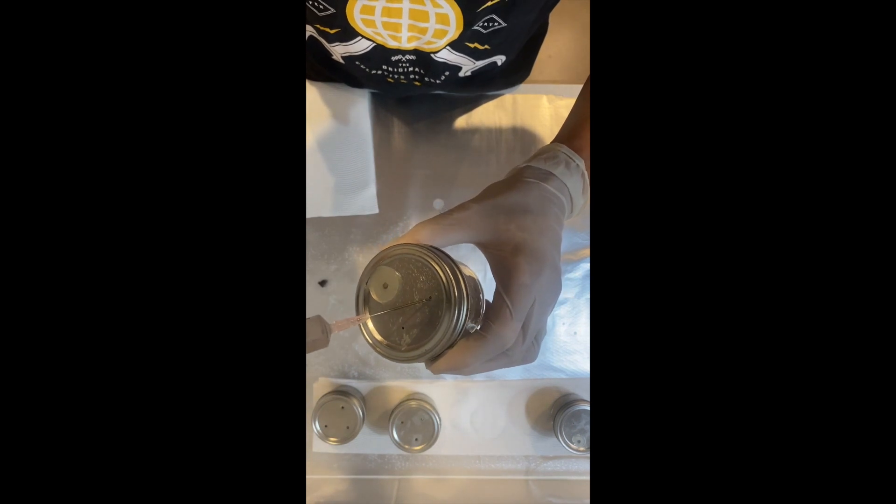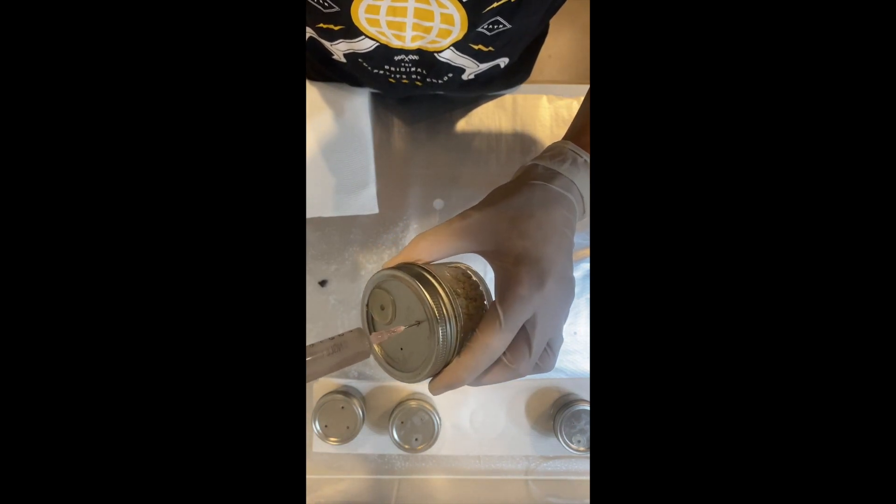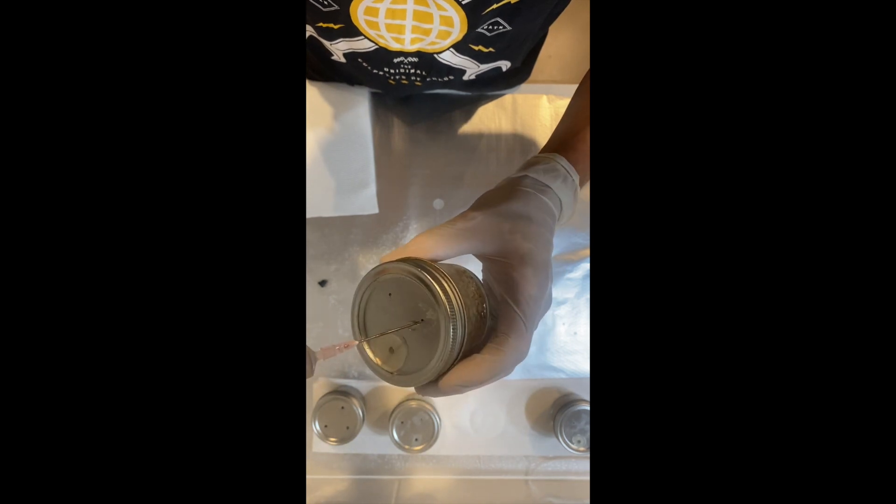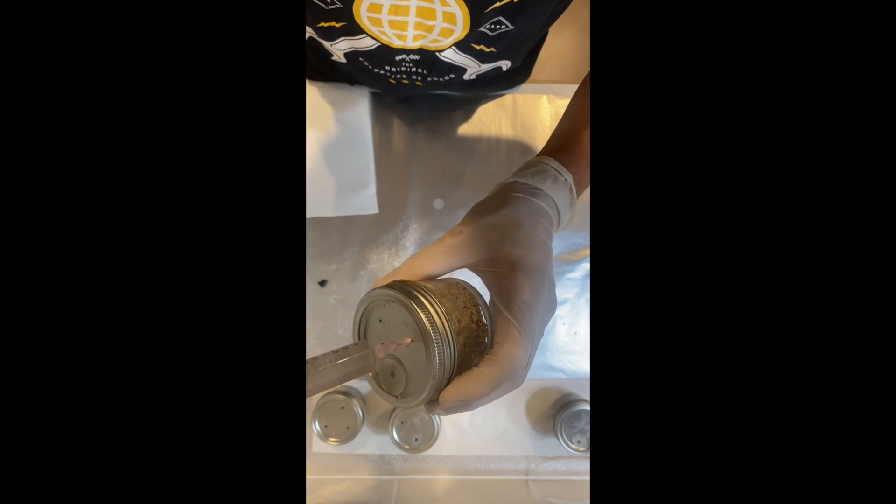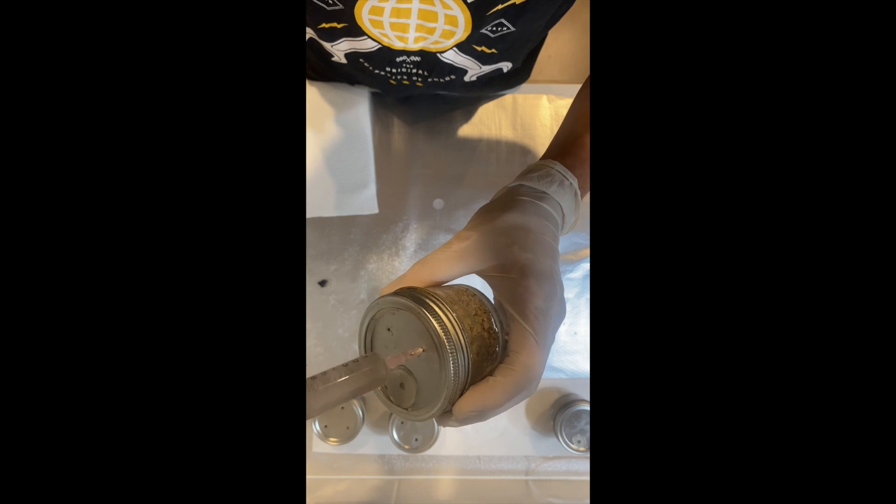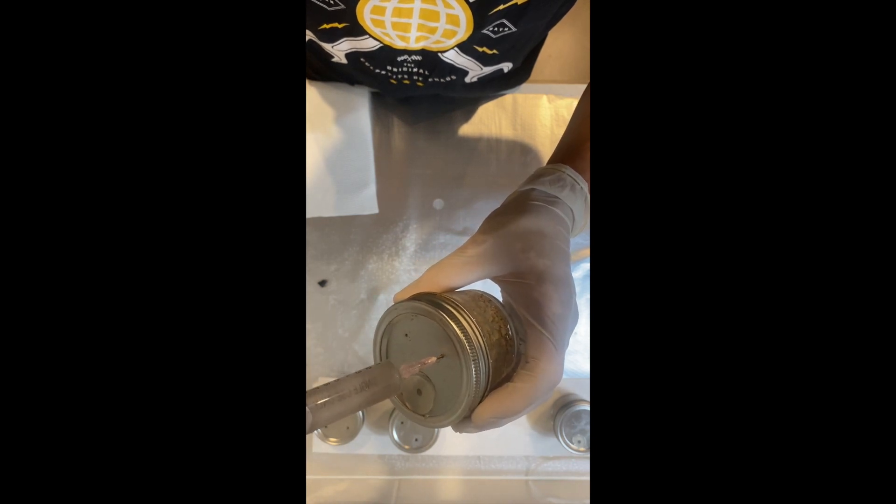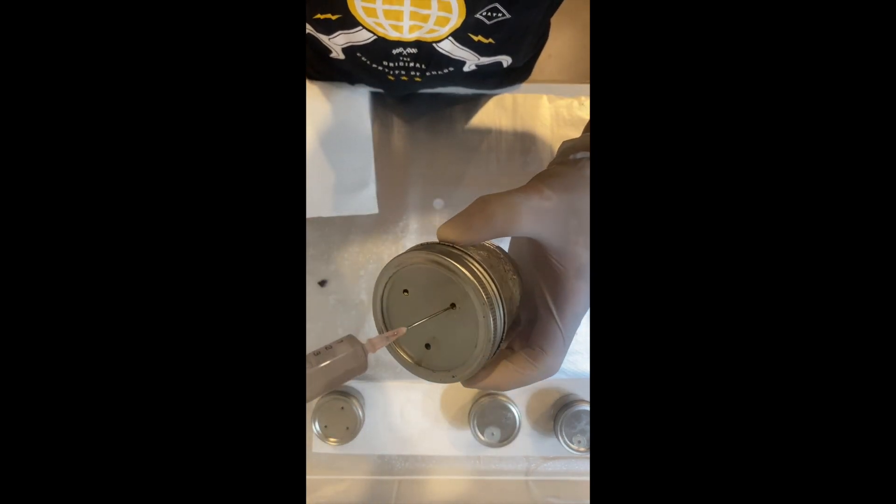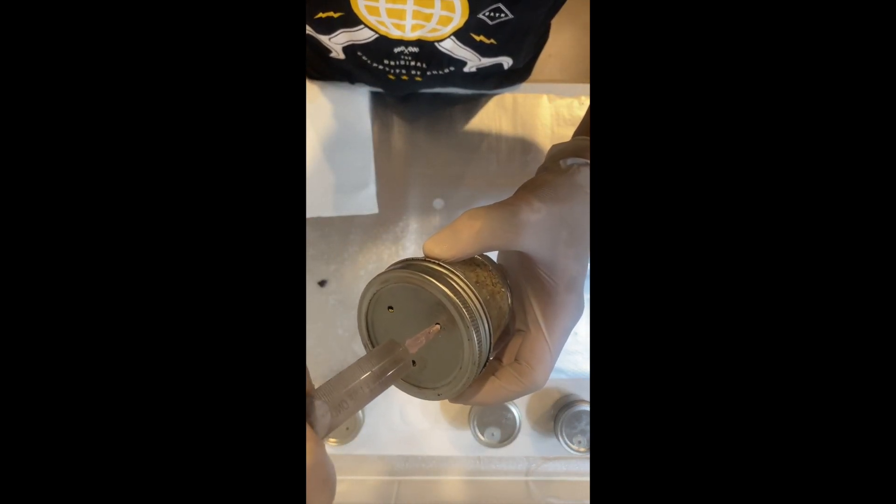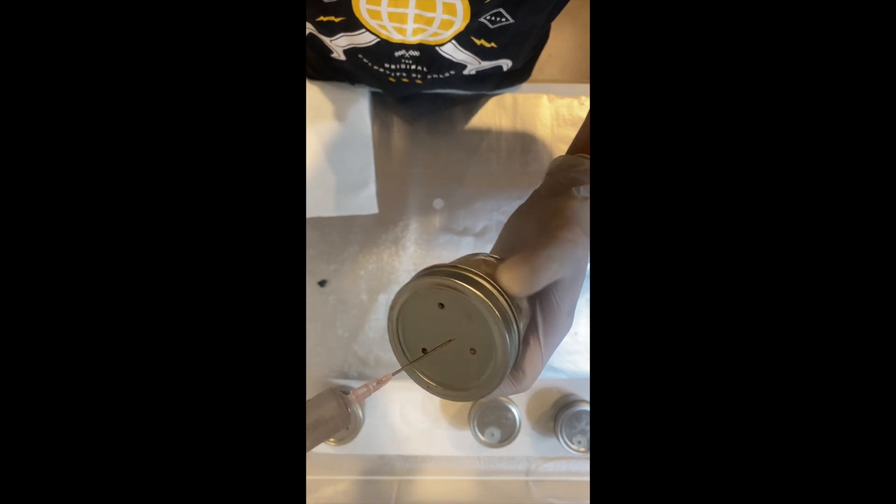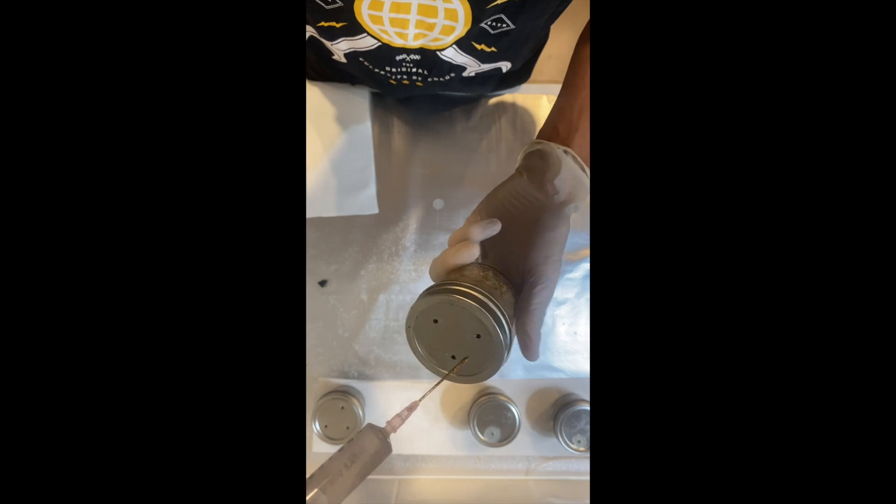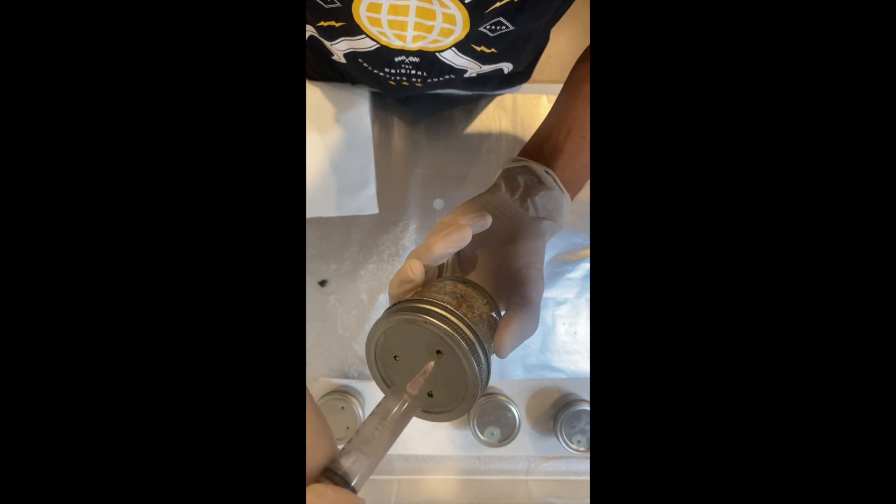I'm going to do the same to the rest of these jars, ideally sterilizing the top with alcohol each time you do it. But once again, this is the way I do it. I've never got a problem. This one has three holes, so we're going to do three: one, two, and three.